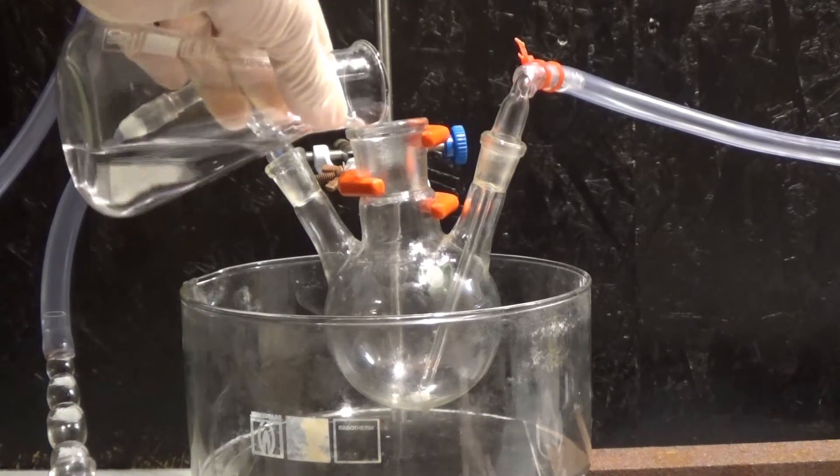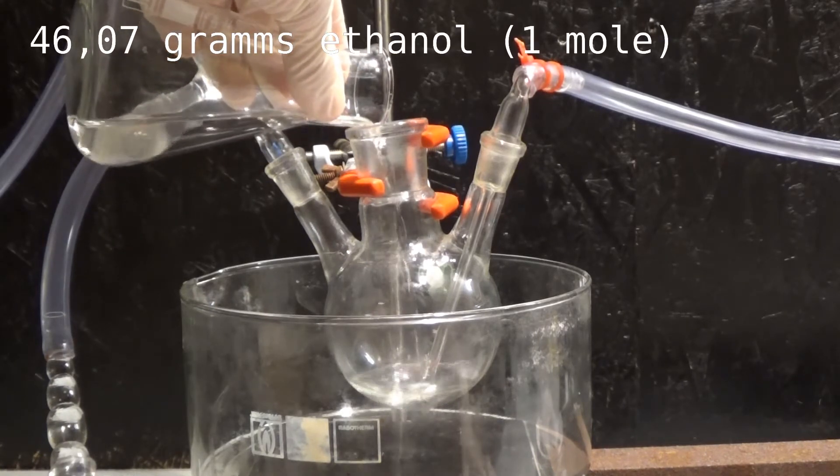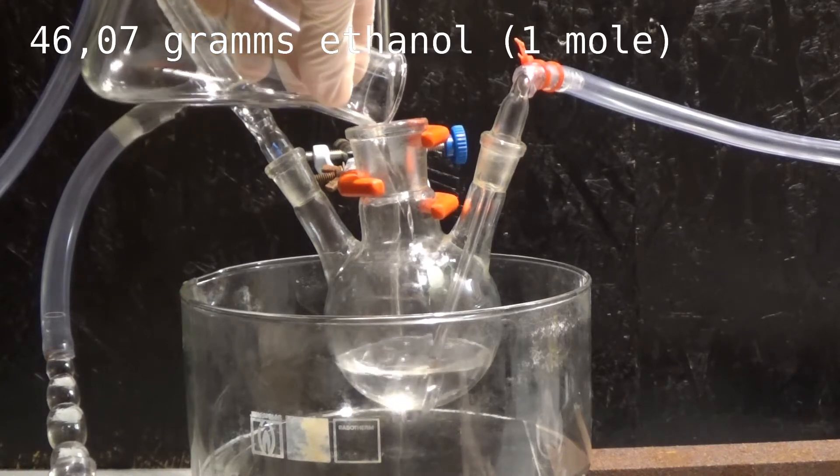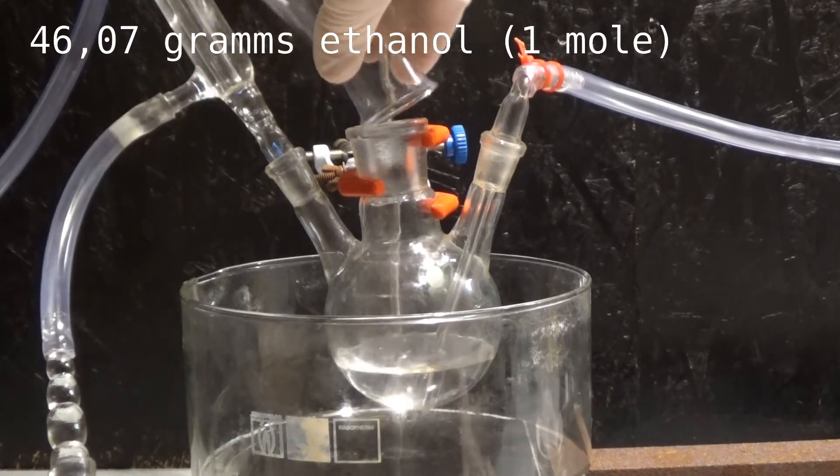Now 46.07 grams pre-dried ethanol is added into the reaction flask. This amount of ethanol corresponds to exactly 1 mol.